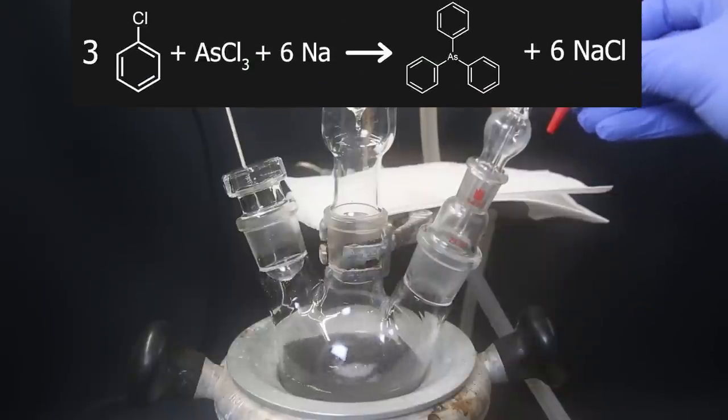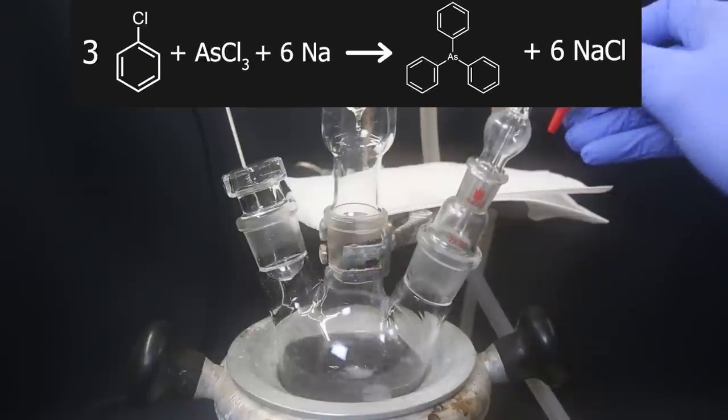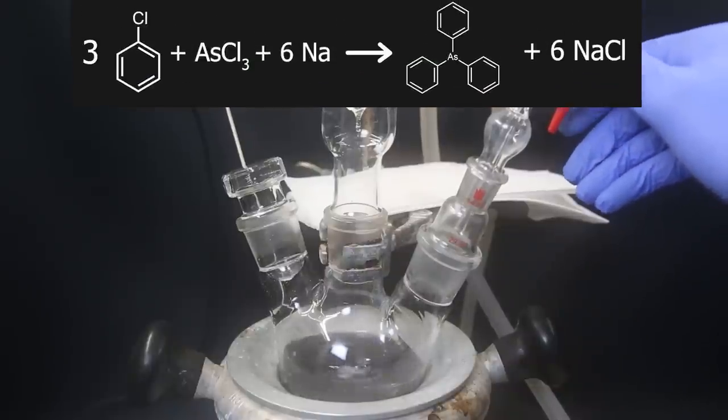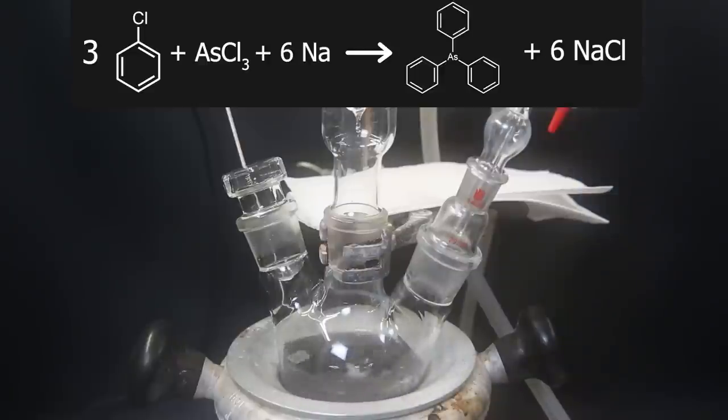In this reaction, the sodium works as a reducing agent, and facilitates the reaction by picking up chlorine atoms. One by one, the phenyl groups can attach themselves to the arsenic, and finally form triphenyl arsine, with sodium chloride as a byproduct.